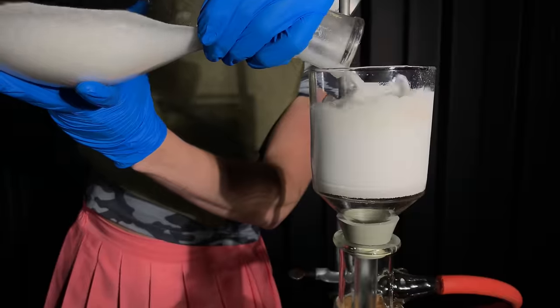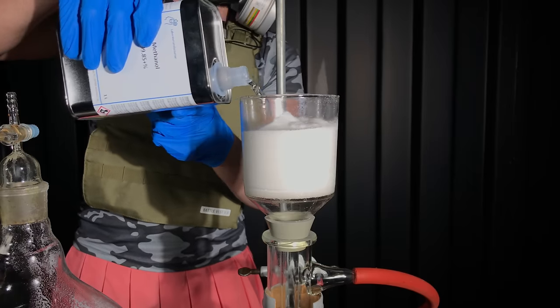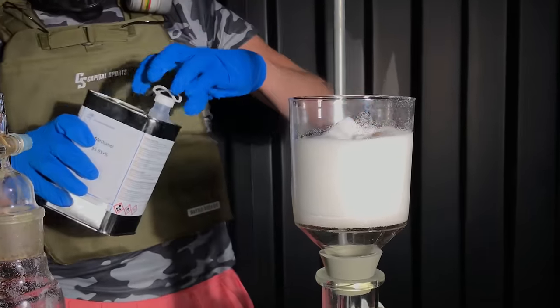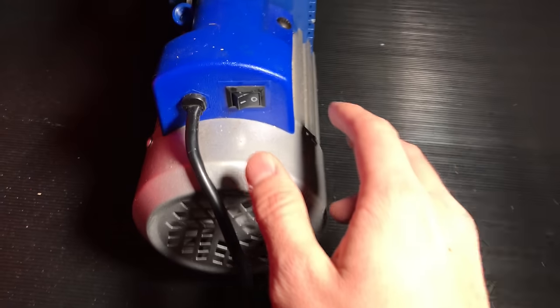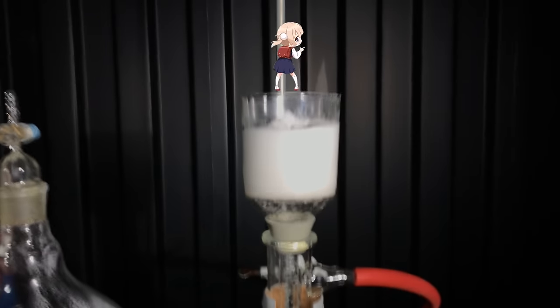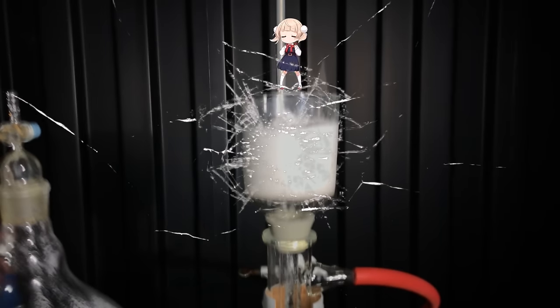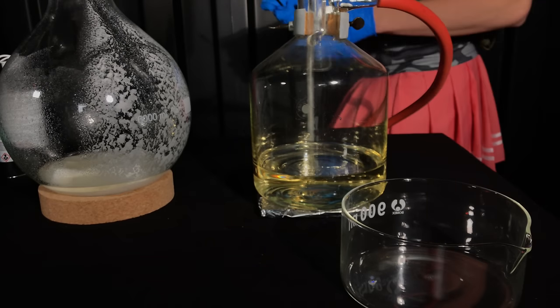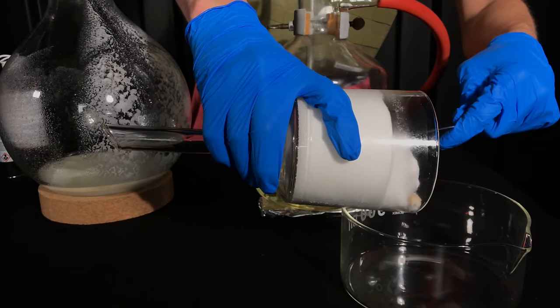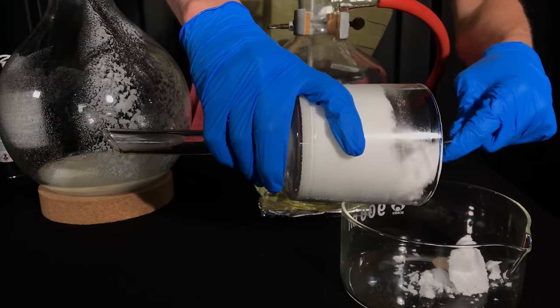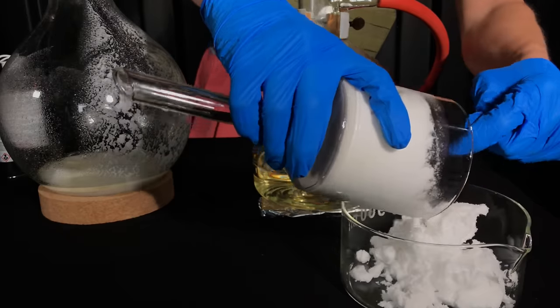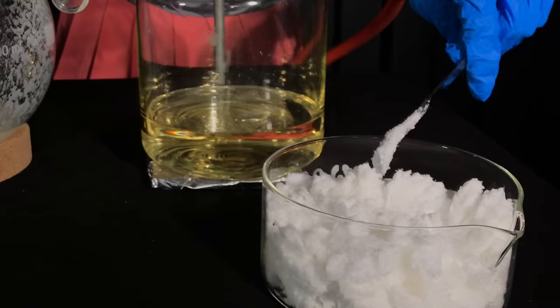Swirl the flask, filter, wash the first batch with methanol to remove excess base and then dry it using a vacuum. Anyways, as the filter is full enough, I will pour the first batch into this massive deformed beaker. But look at this, look at this nice beautiful white powder. I am so happy how well this worked.